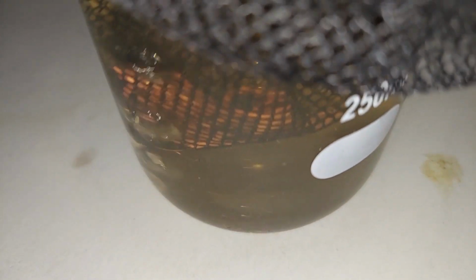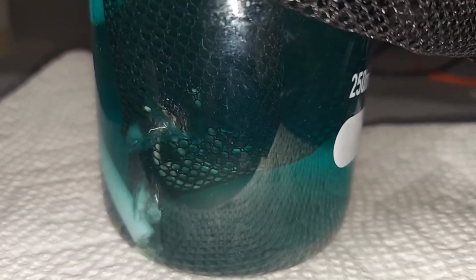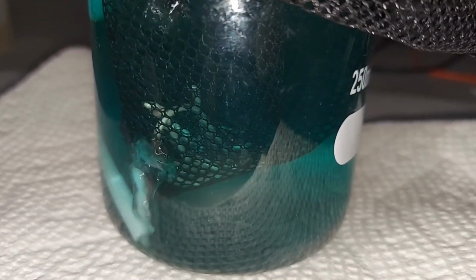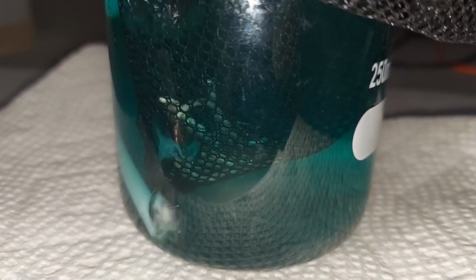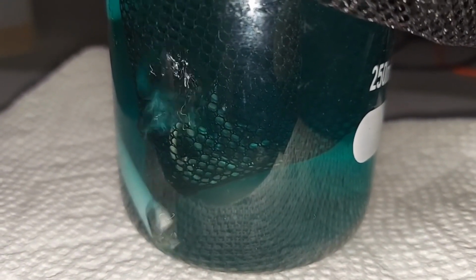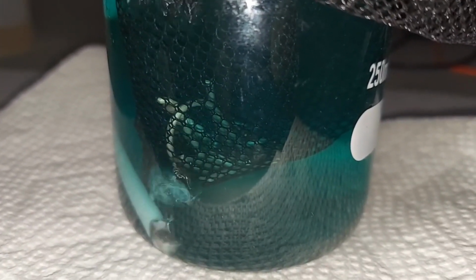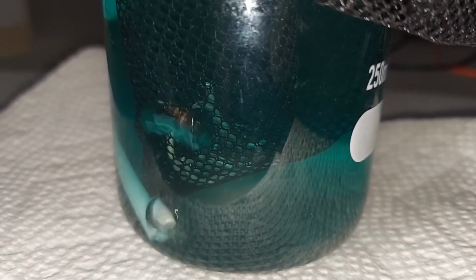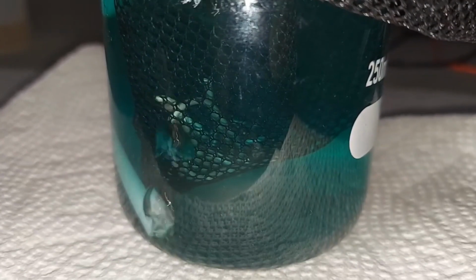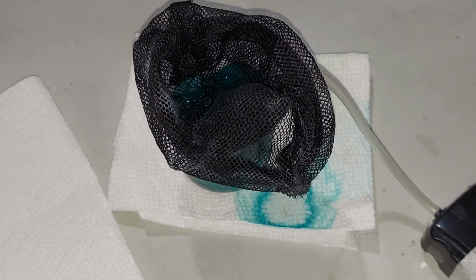Okay, keep watching. Here we are at day 9, and what a difference. That peracetic acid ate into the copper nicely, and there are copper ions everywhere. You can see how green it's become, and those will react with the extra acetic acid, forming even more copper acetate, which was the idea all along. So I'm going to let this run one more day, end at 10 days. I didn't expect that, but we'll stop then and go on to the next step. It's day 10, and it's time to stop this part of the process.